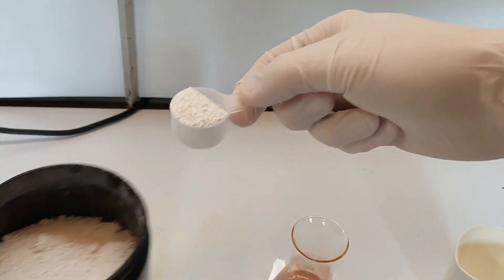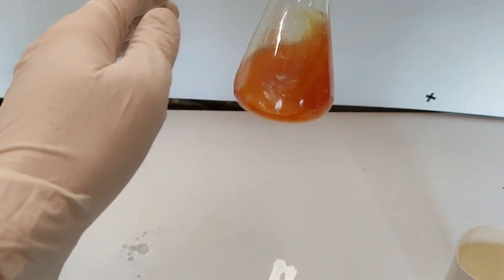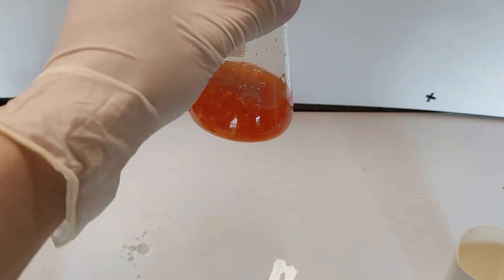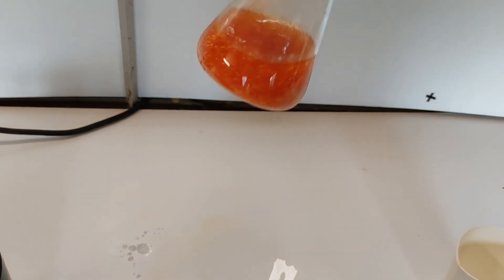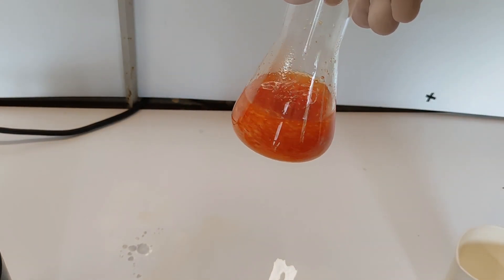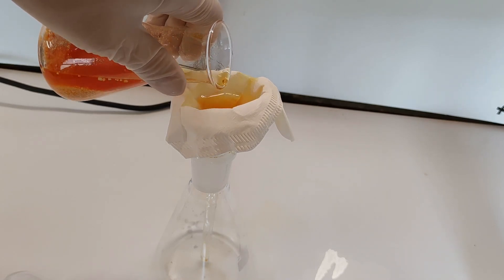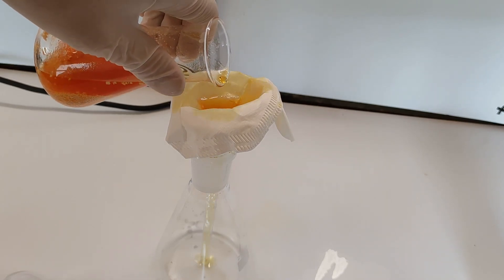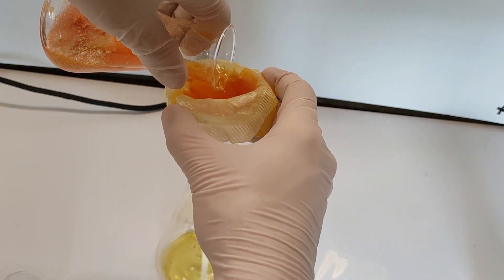The nitrotoluene is dried with anhydrous magnesium sulfate. The magnesium sulfate is then filtered off and a vacuum distillation is prepared.